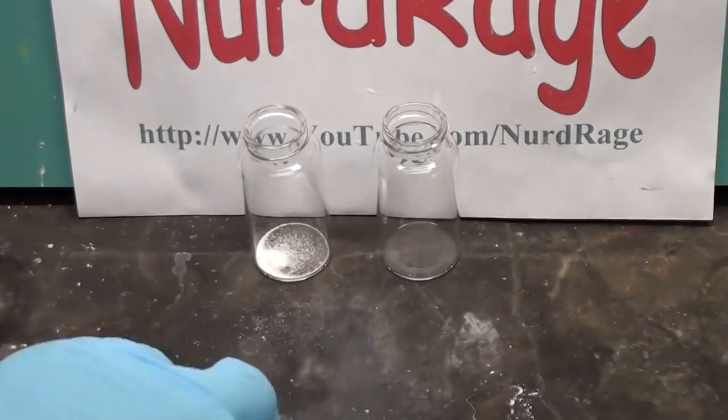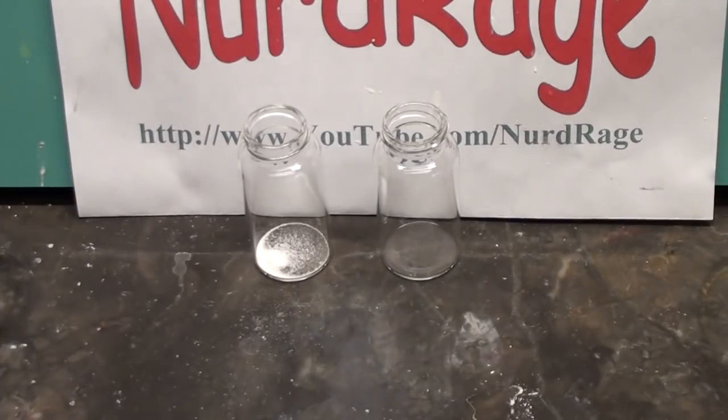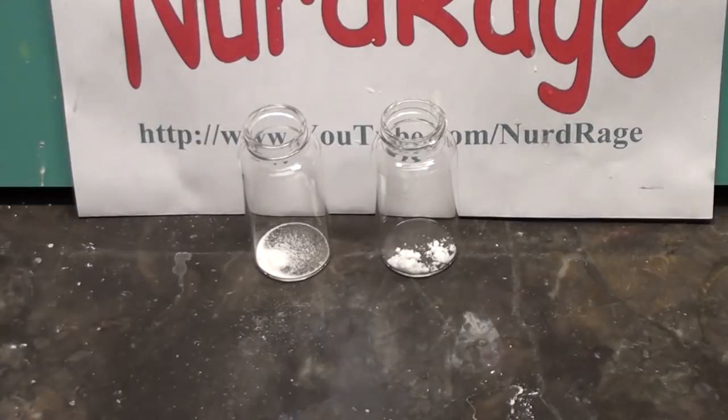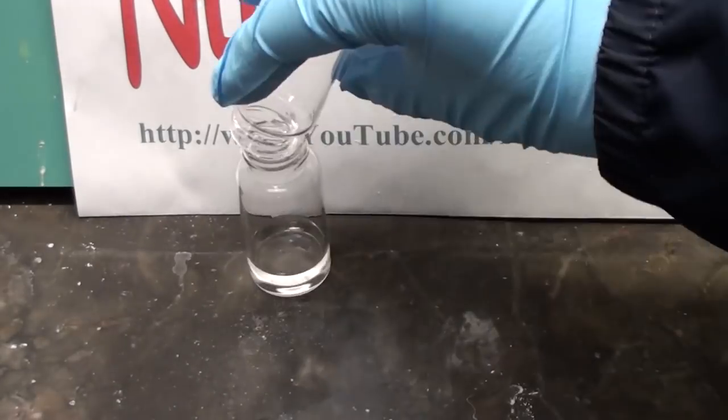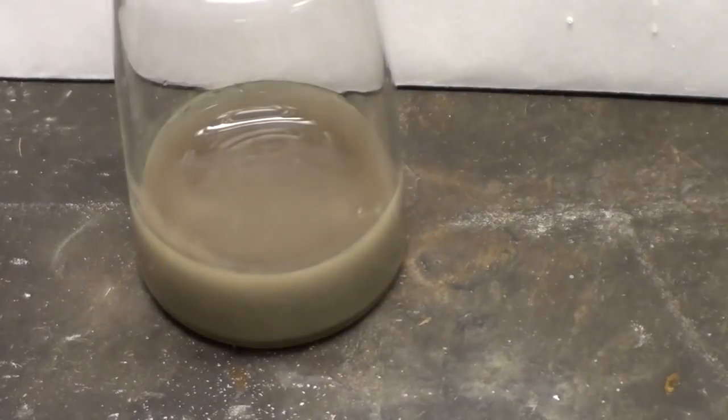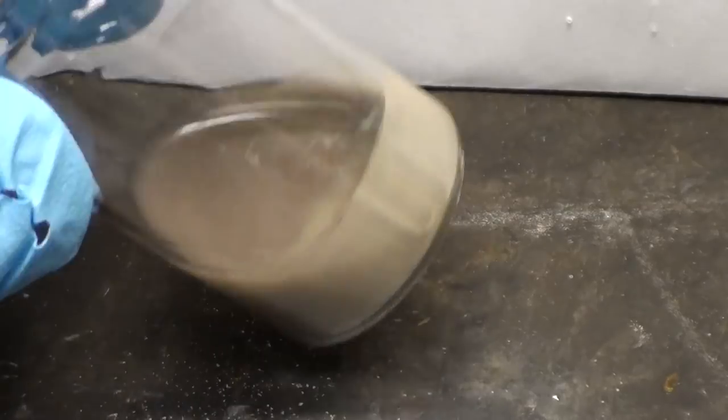To test it, put equal quantities of silver nitrate and hydrazine sulfate in separate vials. Then add just enough ammonia to completely dissolve both of them. Mix them together and after about 10 minutes a silver mirror will form on the inside of the vial.